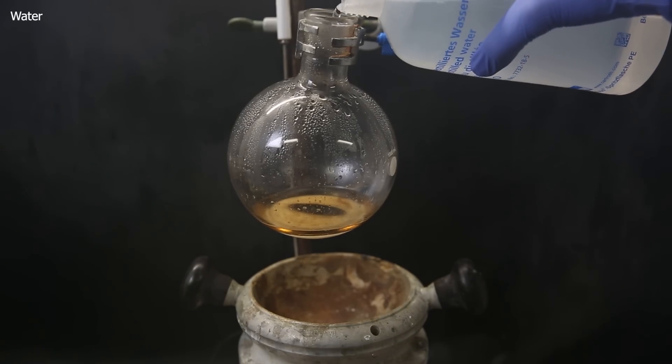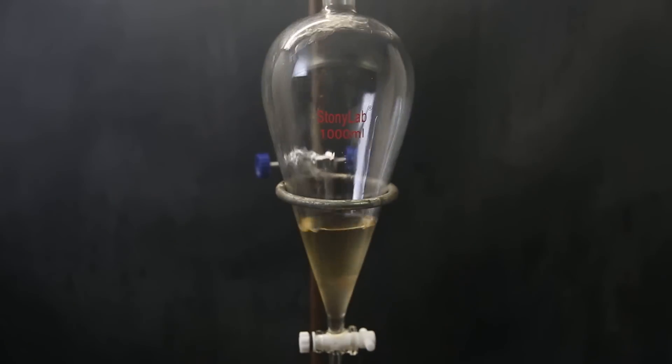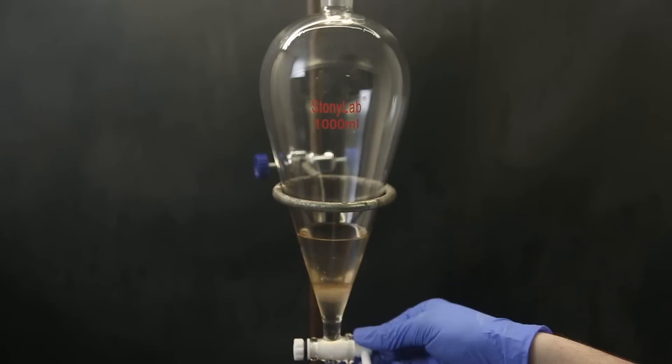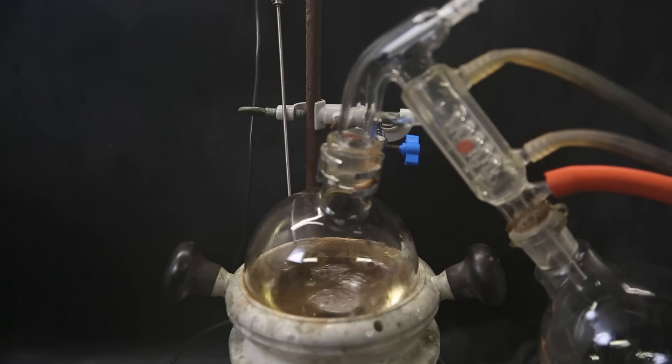So I partition it between more water and ethyl acetate to get rid of the salts and extract out the product. I separate the layers in the separatory funnel and extract the water phase once more with ethyl acetate. I then dry it again with sodium sulfate, filter it, and distill off all of the solvent.